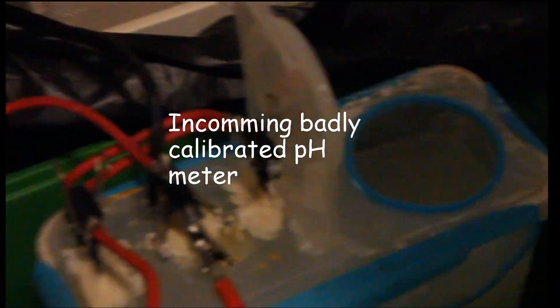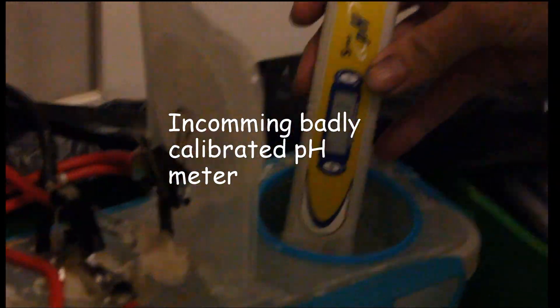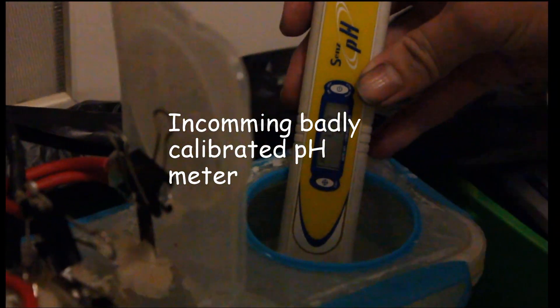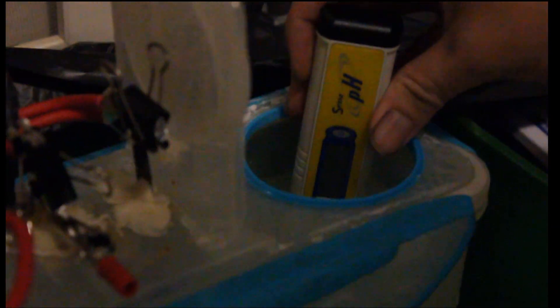Okay, this is where the fumes come out. This horribly horrible smell. Now the pH of this cell is around 4.9. If I go down it would change, but it's staying as 4.9. It's not changing. That's good for us.